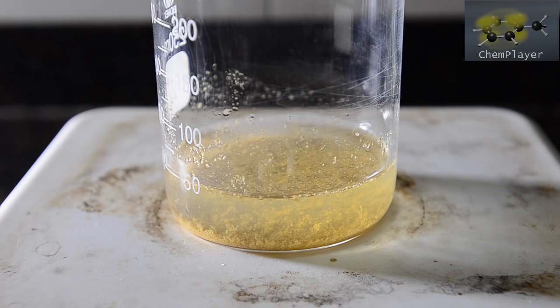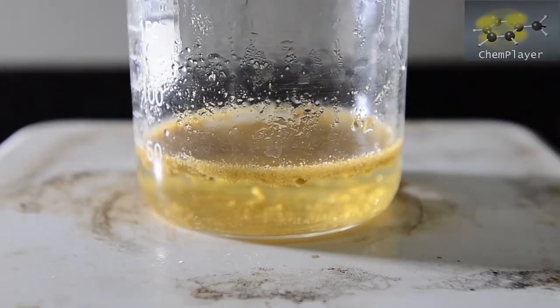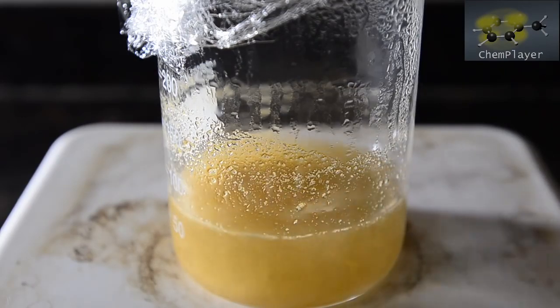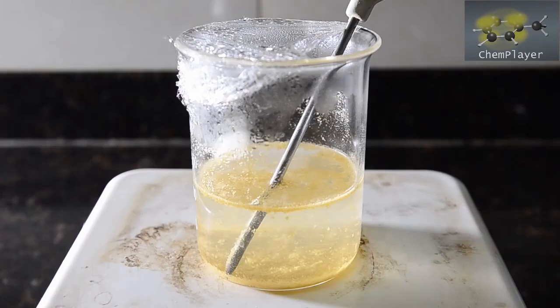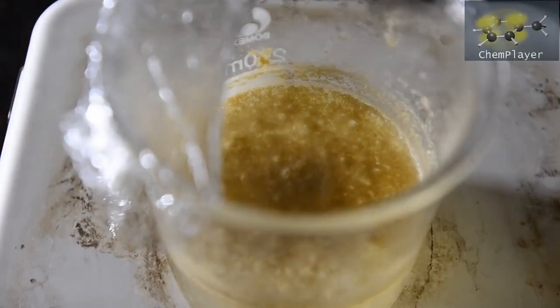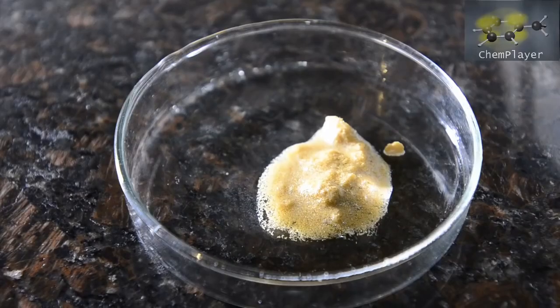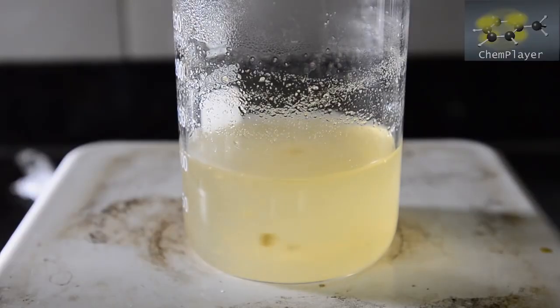Now we're going to heat and see if we can get this to dissolve. We covered the top of the beaker with plastic wrap in order to insulate a little bit. Well, it's pretty hot and there's a lot of solid undissolved, so we're going to add some more water. Getting hot again. And still we've got some solid undissolved, so we add a bit more water to make up to about 100 ml in volume. It looks like there's some fluffy brown material which just won't dissolve. So we decided to use a spatula to remove this from the surface. Okay, most of it has gone now, so we're ready to do the conversion.